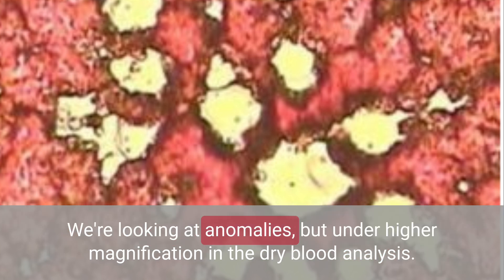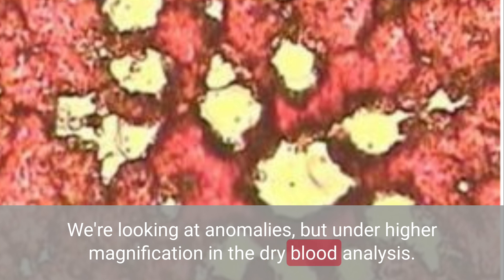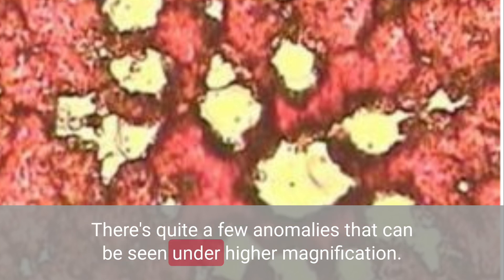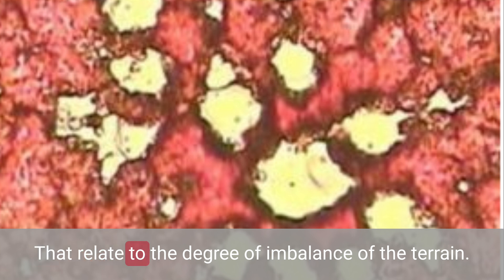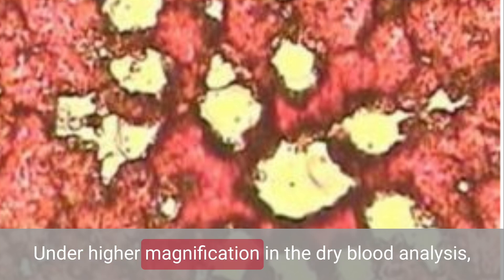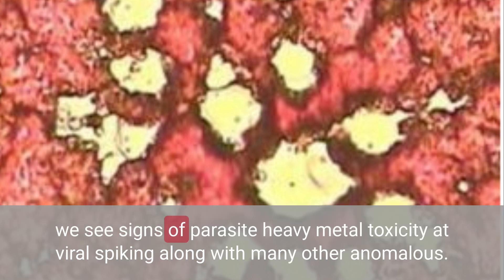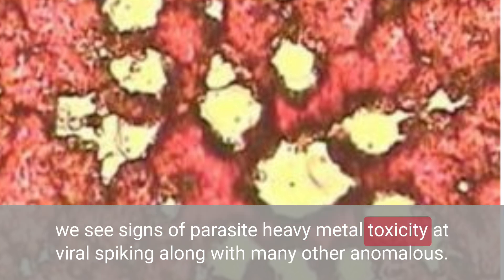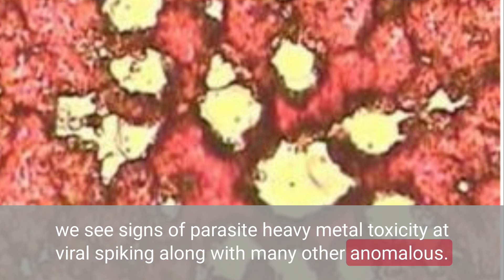We're looking at anomalies under a higher magnification in the dry blood analysis. There are quite a few anomalies that can be seen under higher magnification that relate to the degree of imbalance of the terrain. Under higher magnification in the dry blood analysis, we see signs of parasite, heavy metal toxicity, and viral spiking, along with many other anomalies.